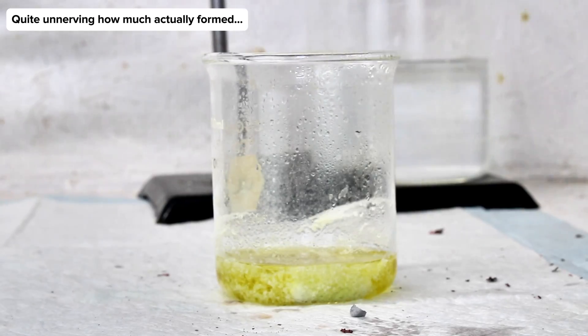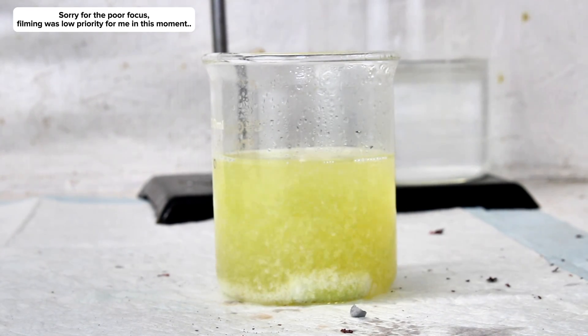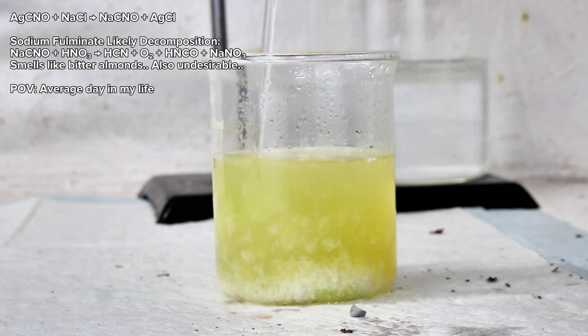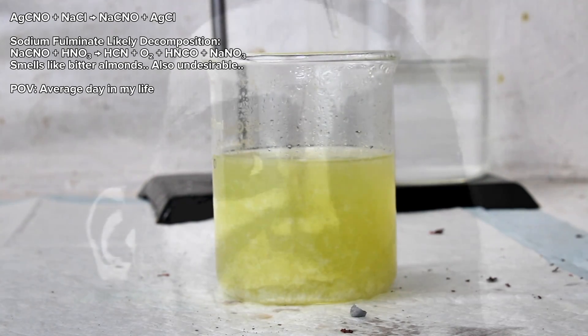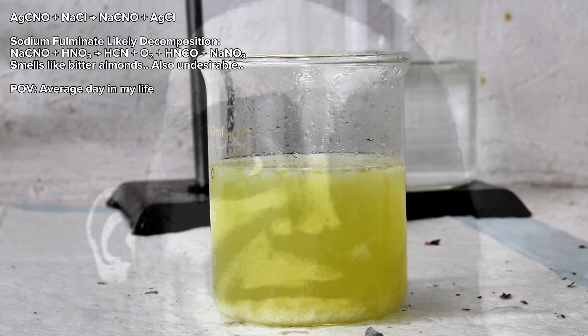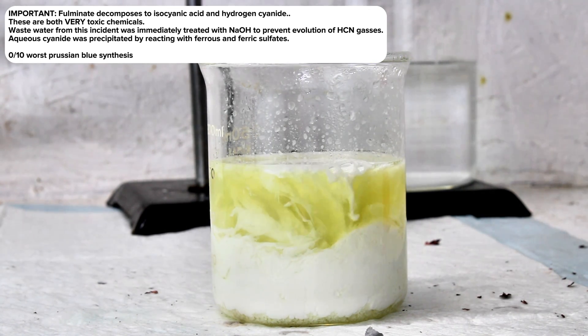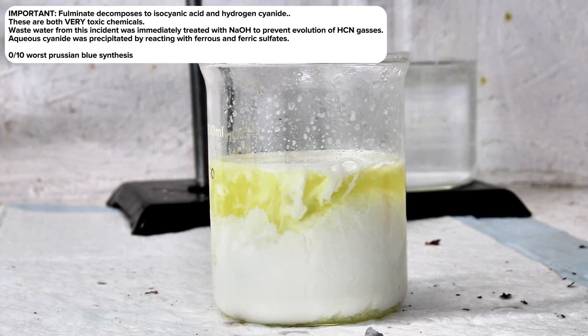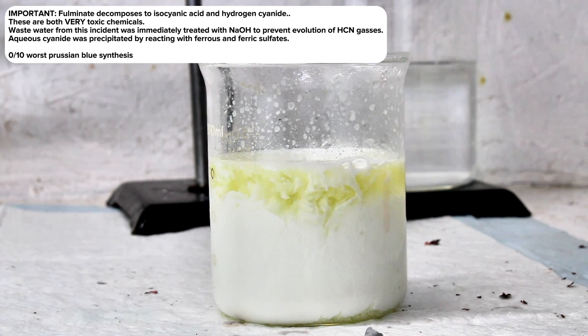What I came up with was to simply add a massive excess of saturated sodium chloride and let the two react for a while under a bit of stirring. The idea here was that silver chloride is far less soluble than silver fulminate, and so the silver fulminate would react with the sodium chloride, forming silver chloride and sodium fulminate. Soluble fulminates are extremely unstable and decompose in solution fairly quickly, leaving behind a solution that can be safely vacuum filtered to collect the silver chloride.